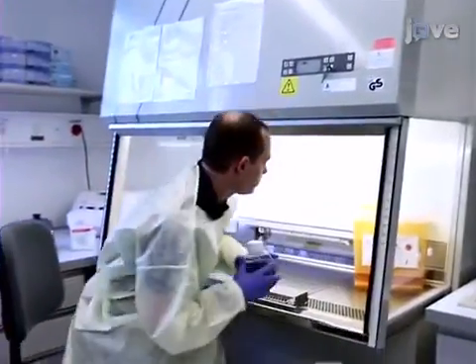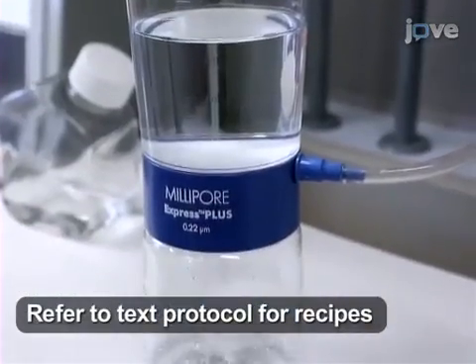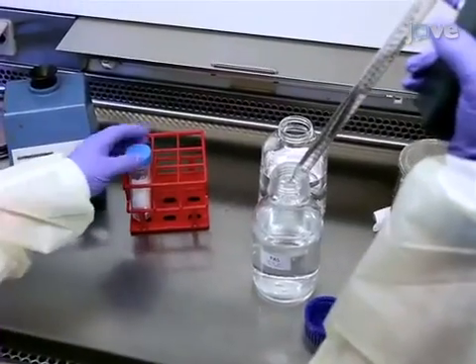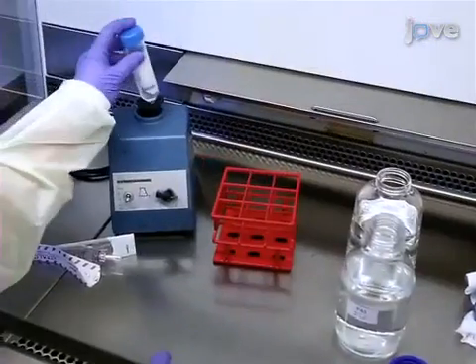To test a water sample, filter a 500 to 1000 milliliter sample through a 0.22 micrometer pore size membrane. Then, place the membrane in Page's amoeba saline, or PAS, and shake it.